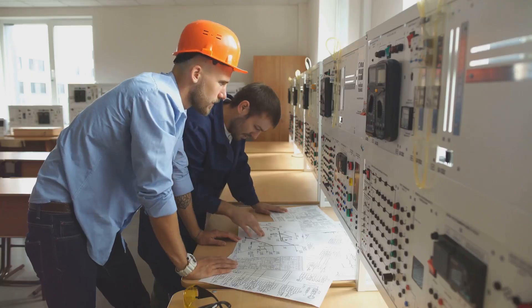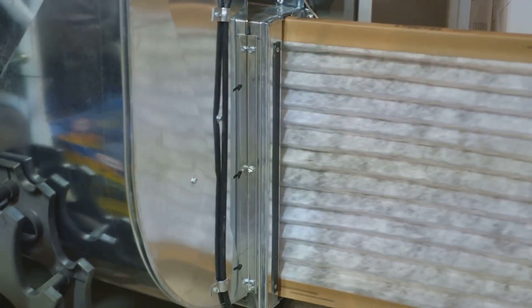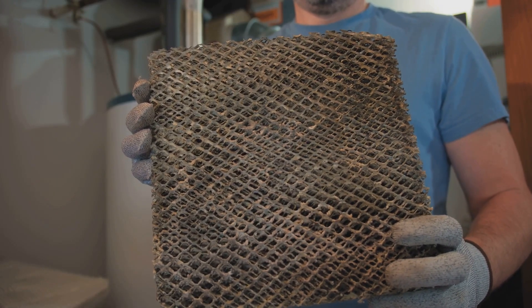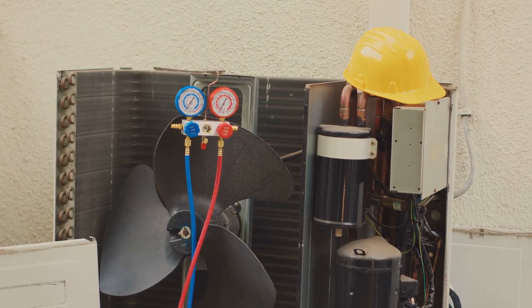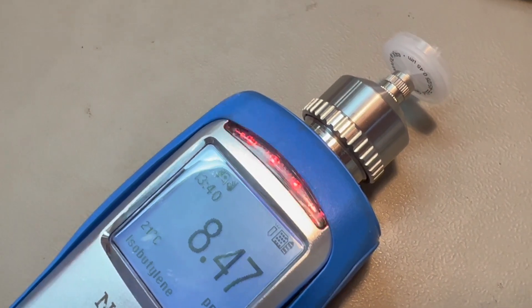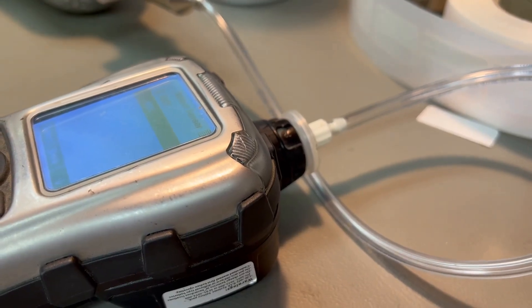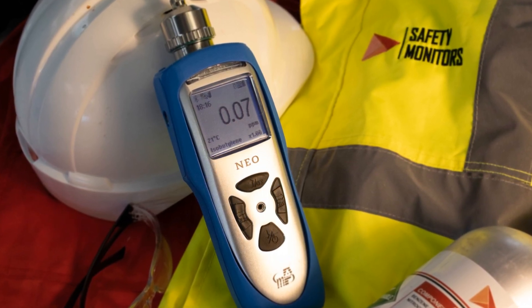And don't forget those correction factors — they're the secret handshake that unlocks accurate VOC identification. Next, let's talk about filters, the unsung heroes of PID maintenance. These little guys work tirelessly, filtering out dust, dirt and contaminants that can clog the sensor. Check those filters regularly and replace them as needed. Finally, show that UV lamp some love. Just like a car's headlights get dimmer over time, UV lamps gradually lose their intensity. Regular cleaning with a soft, lint-free cloth removes grime, and when the time comes, don't hesitate to replace the lamp.